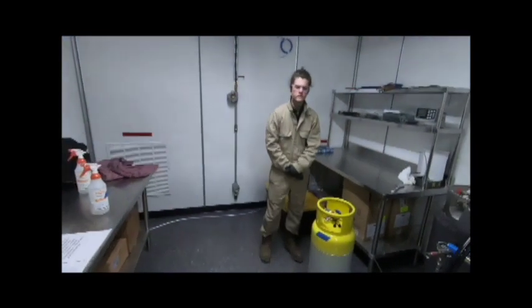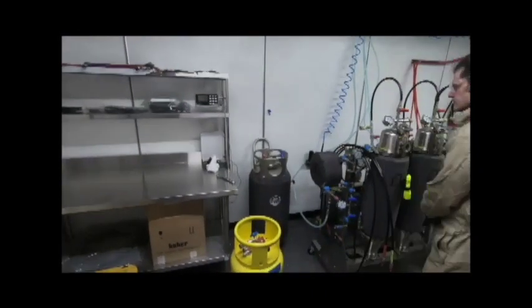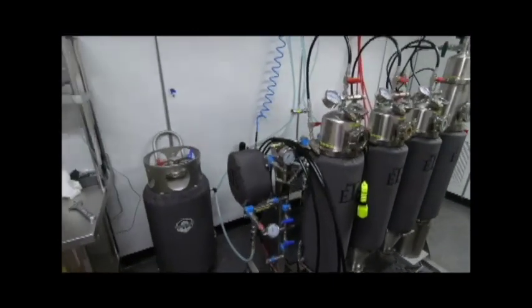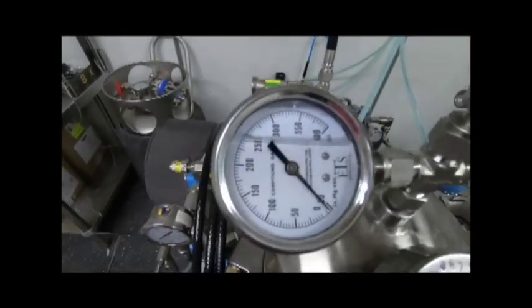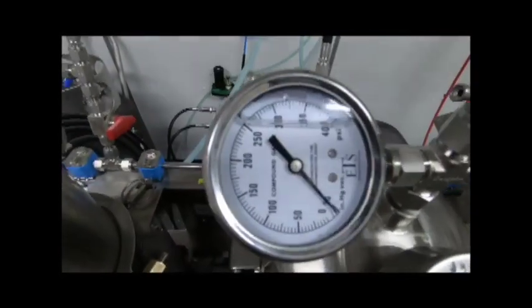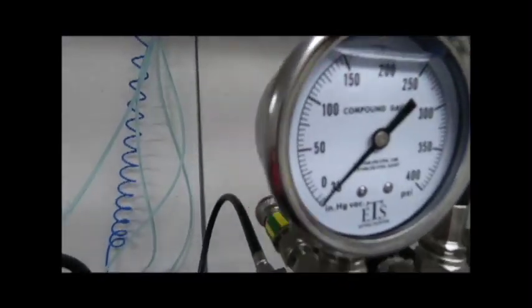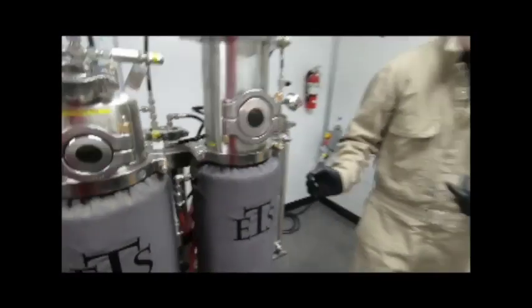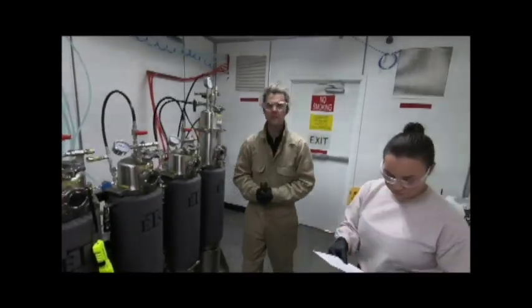Visually we're going to turn for 5 minutes to make sure negative pressure holds and there are no leaks. Can you explain what you're visually looking at? Now we have finished pulling a vacuum. We've closed all the valves. Now we want to make sure that she stays at a vacuum. That way if she stays at a vacuum obviously the system is airtight. So you're just looking at the gauge?